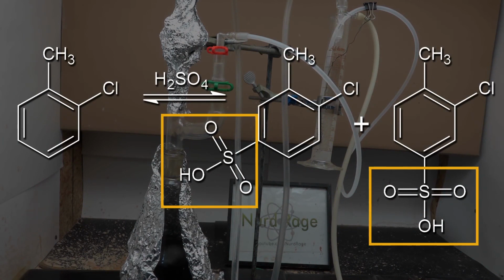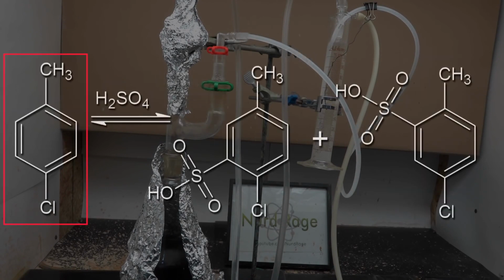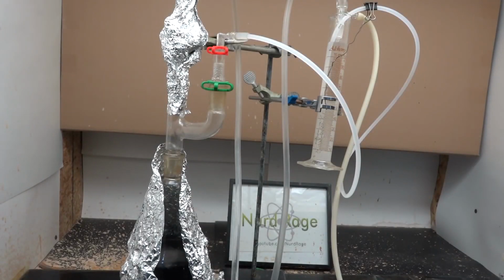This is because the sulfonate group is quite bulky and thus is more stable on positions far away from any other substituent. On orthochlorotoluene, this is easy since there are 2 positions it can react with that aren't beside another substituent. But on parachlorotoluene, wherever it goes, it will bump against another substituent. So parachlorotoluene sulfonation is less favored than orthochlorotoluene. This effect of physical crowding affecting reactivity is called the steric effect.